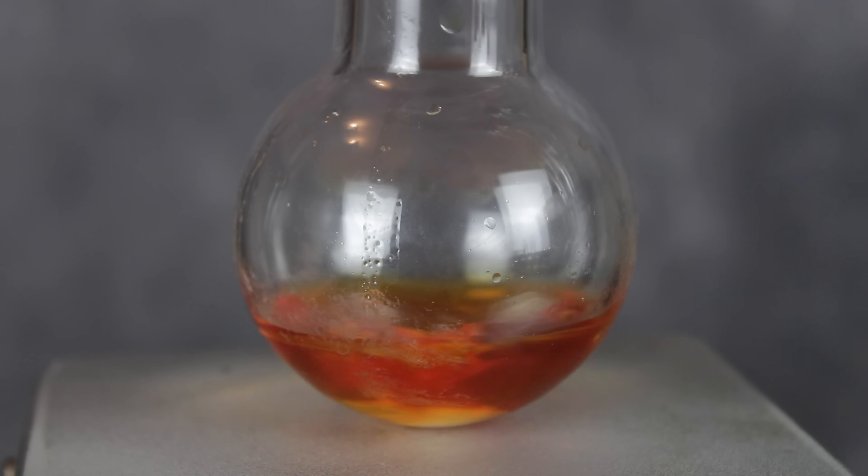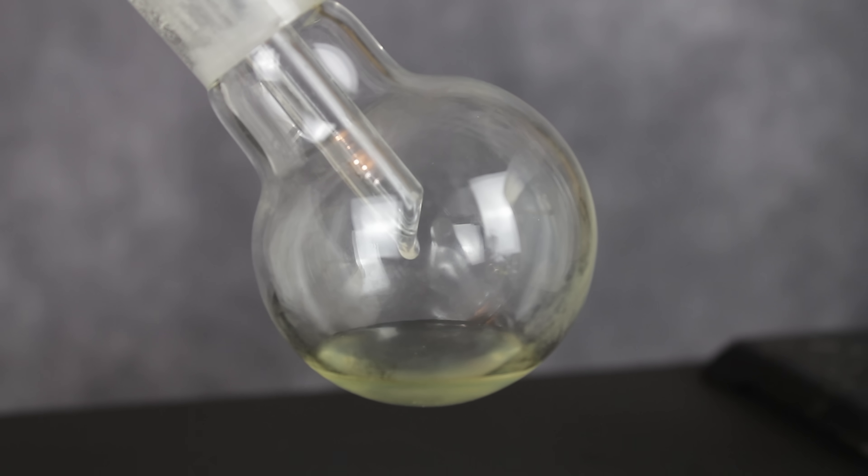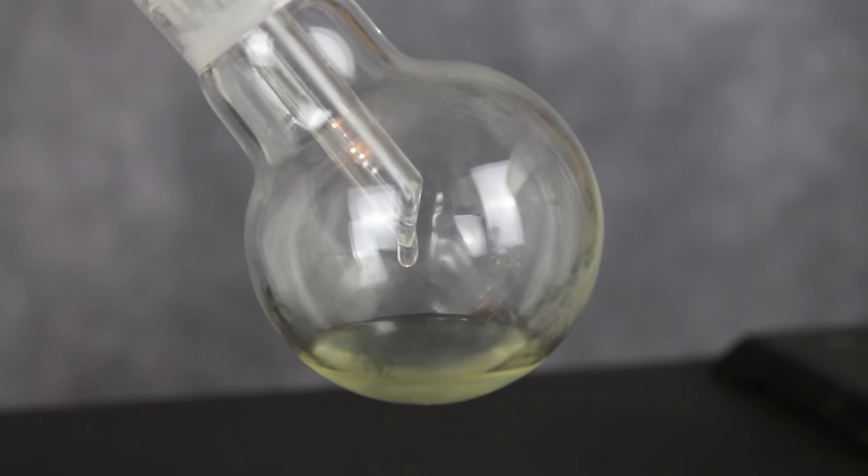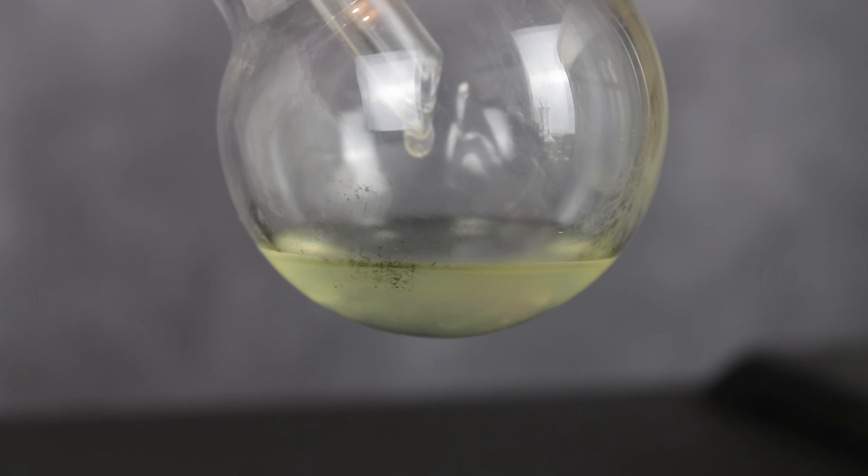Then, a strong vacuum was pulled on the distillation setup and the nikethamide was distilled over. Ultimately, this should have been the final step, and the product I wound up with should have been almost perfectly pure. But naturally, I had to screw up something completely trivial.